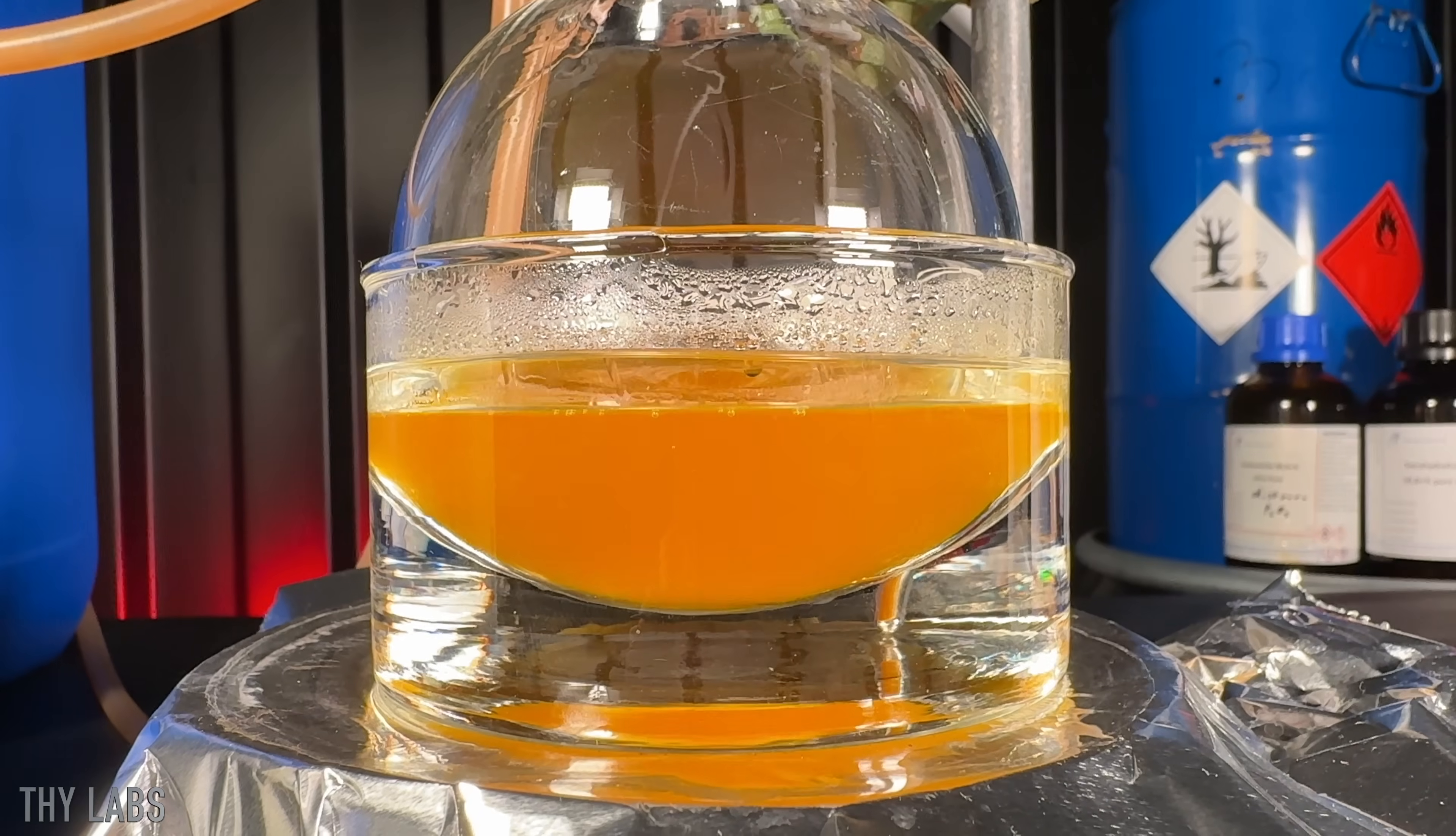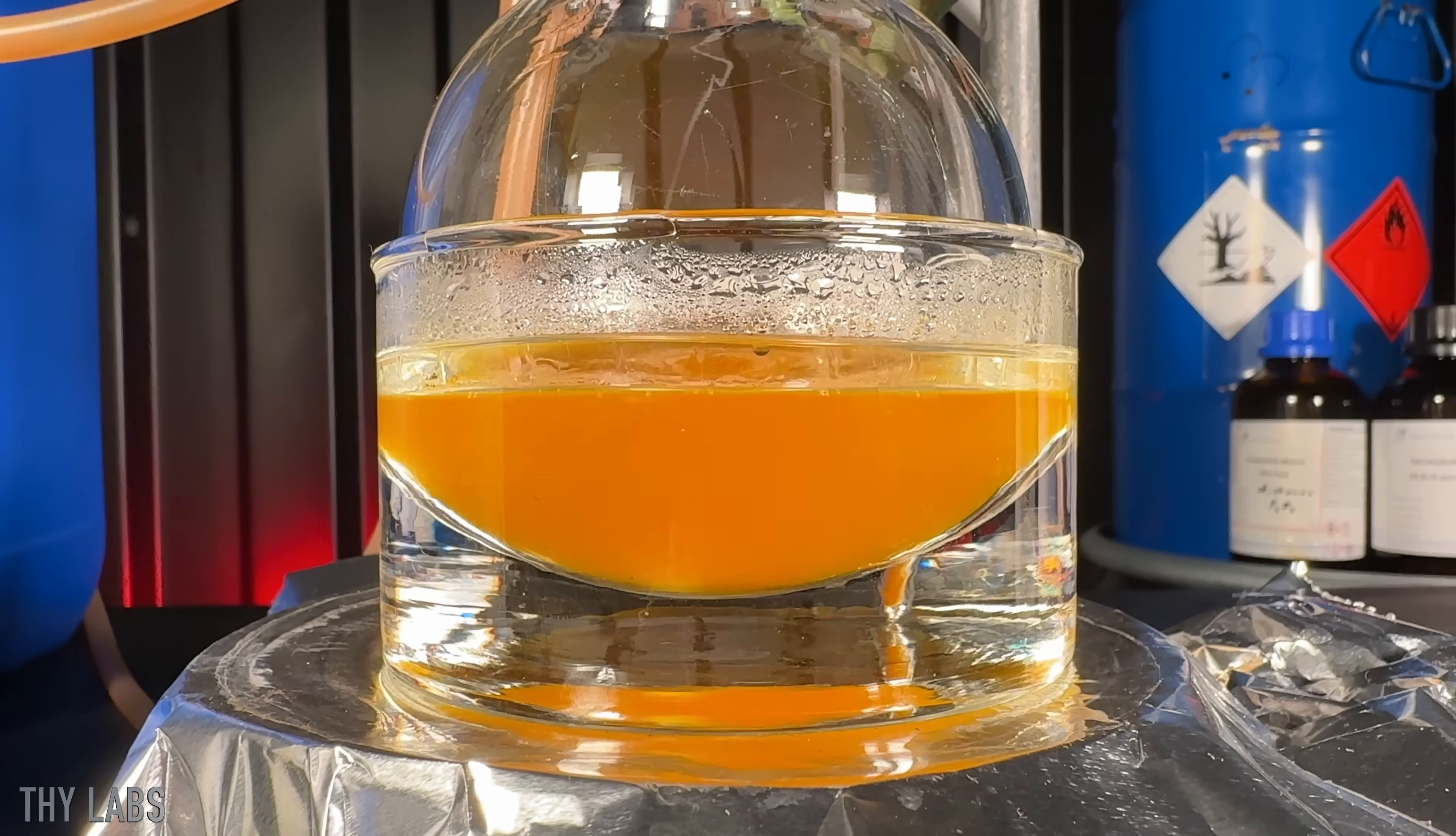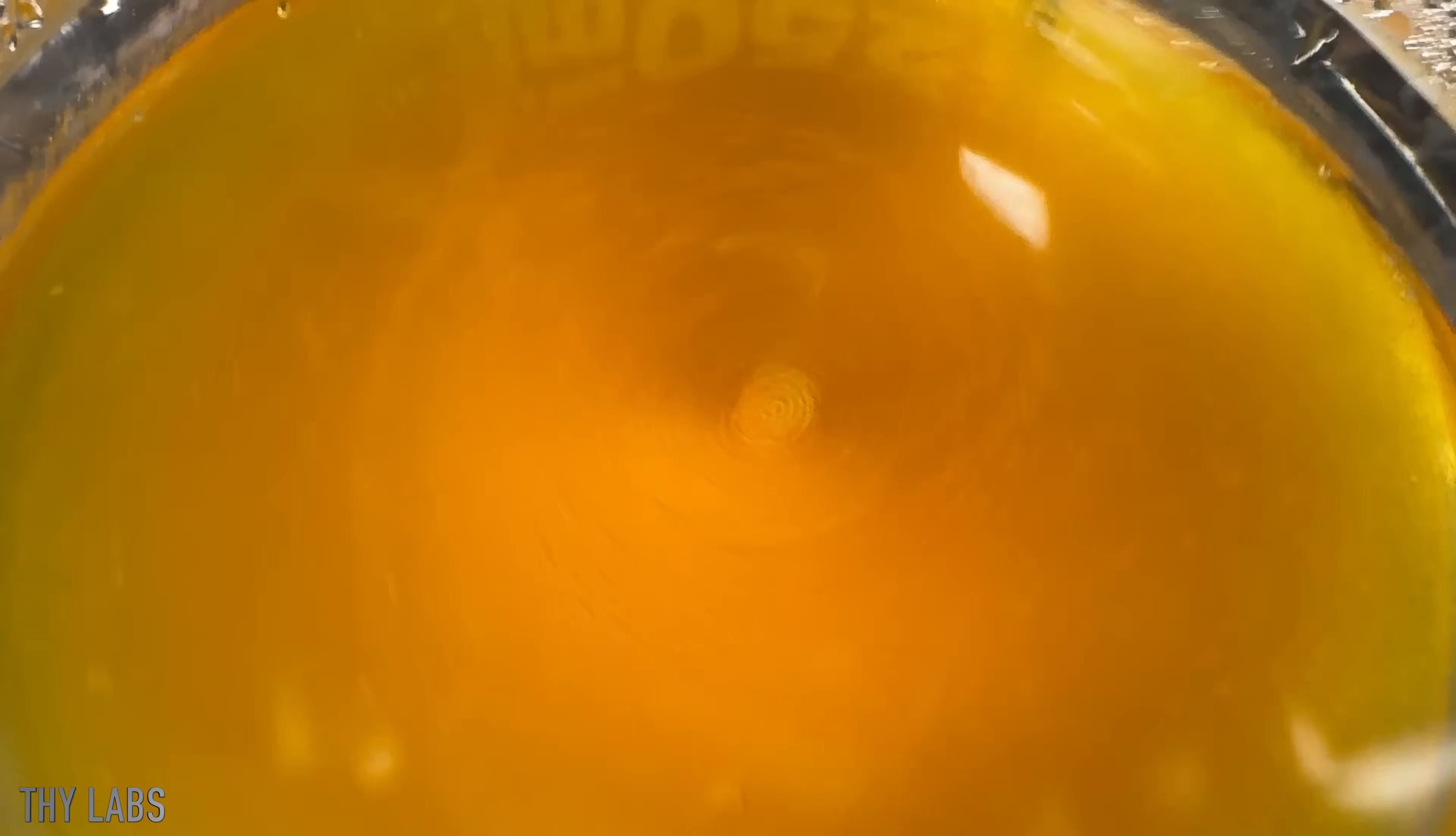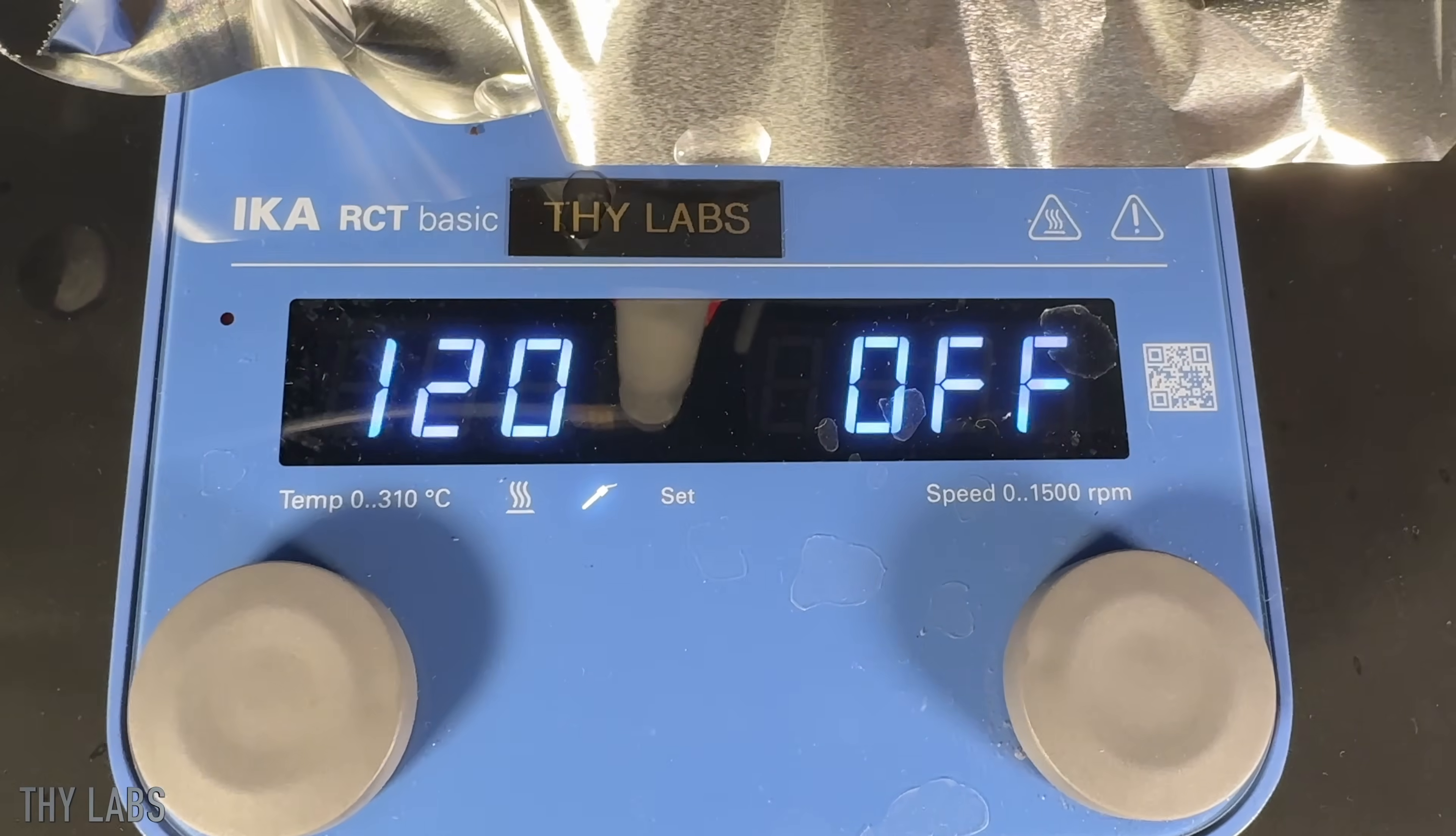When I turn off the light and show you the laser beam, it is even more pronounced. Once finished, the contents of the flask looked like this. It wasn't clear anymore and it was even more orange. I turned off heating and stirring and waited for it to cool down before I could do the next step.